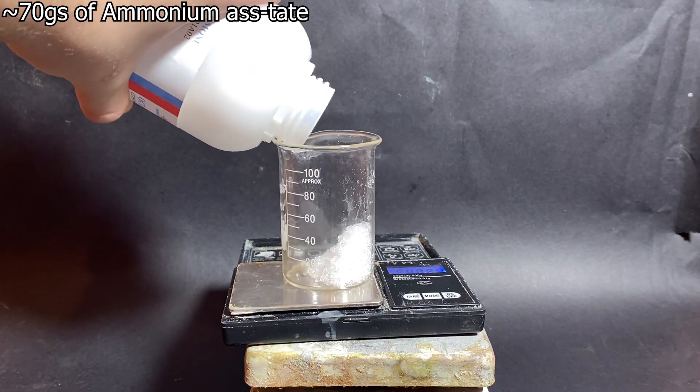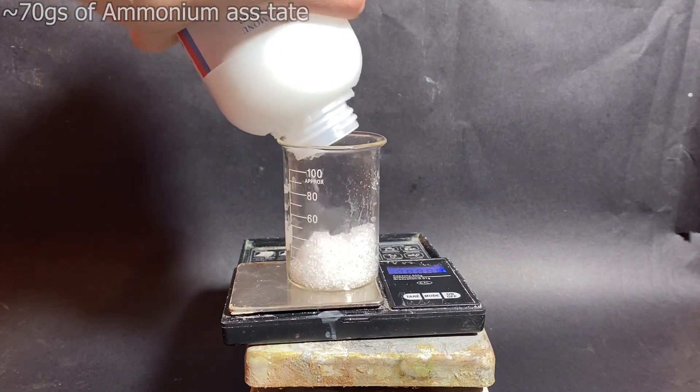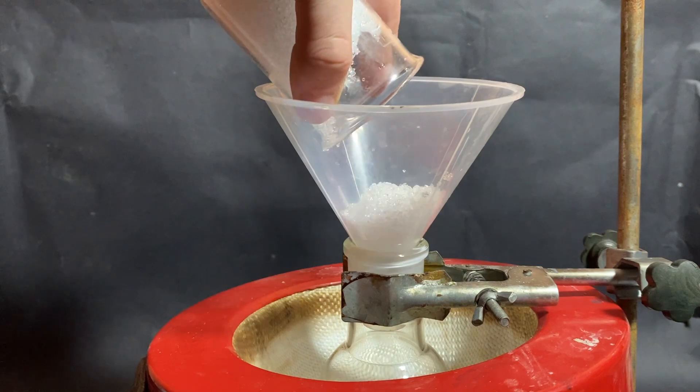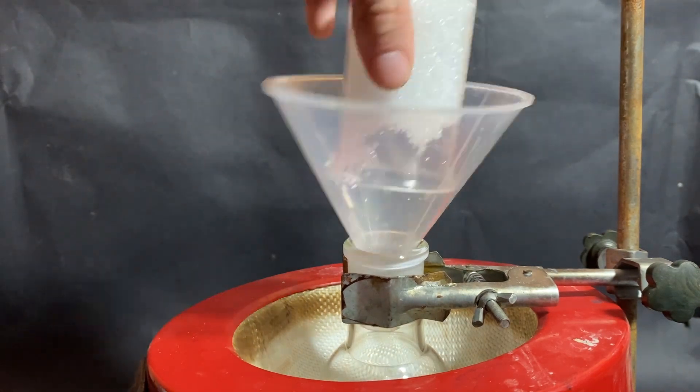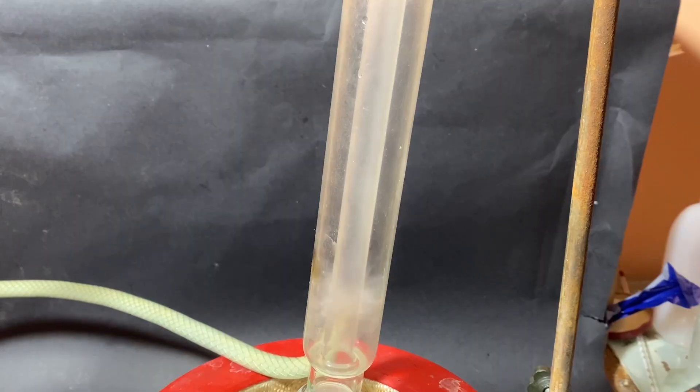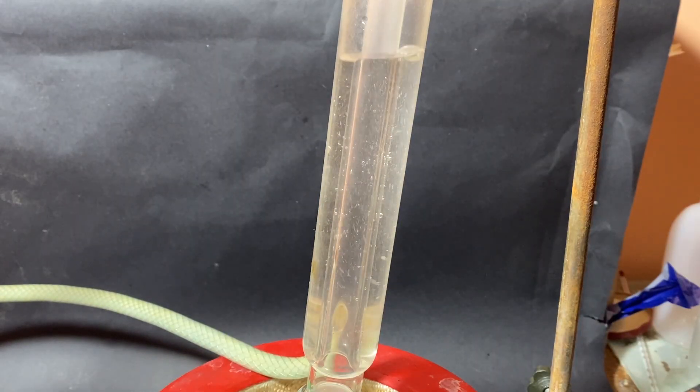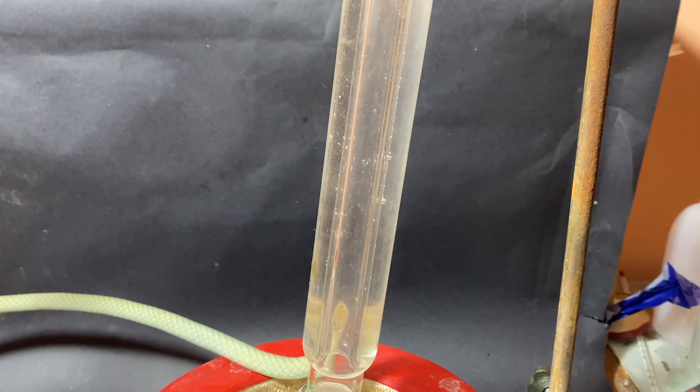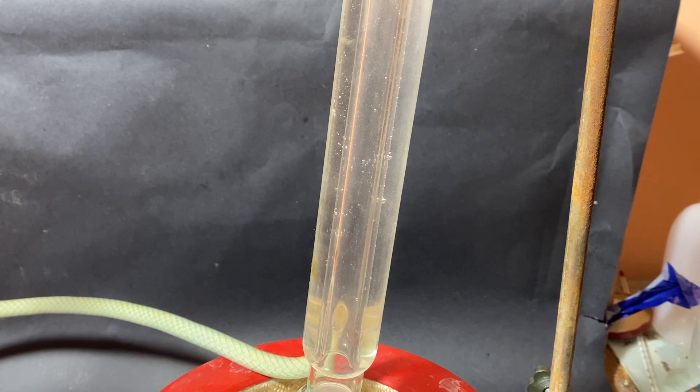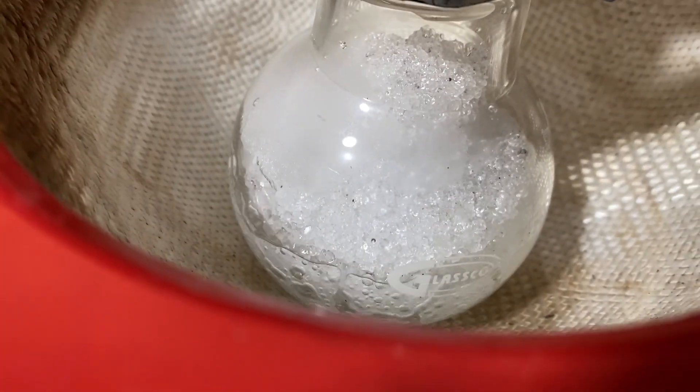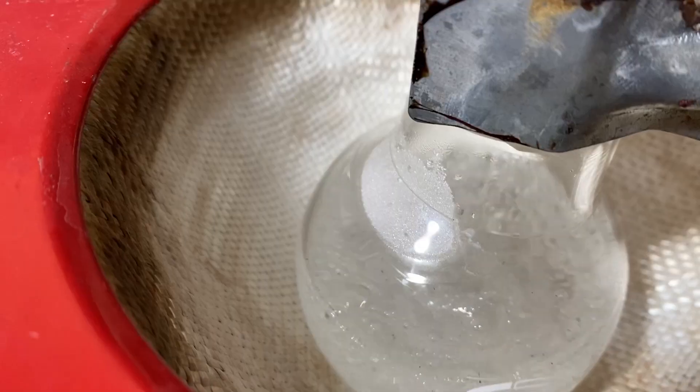So to start off, I've weighed out around 70 grams of ammonium acetate. Then I've added it into a 100ml round-bottom flask that was placed into a heating mantle. A Liebig condenser was attached on top and filled with water. I've cranked the heating mantle to the max. If you know how to chemistry, you probably know we're going to be performing a reflux. As the temperature goes up, the ammonium acetate crystals eventually start to liquefy and they start breaking down.